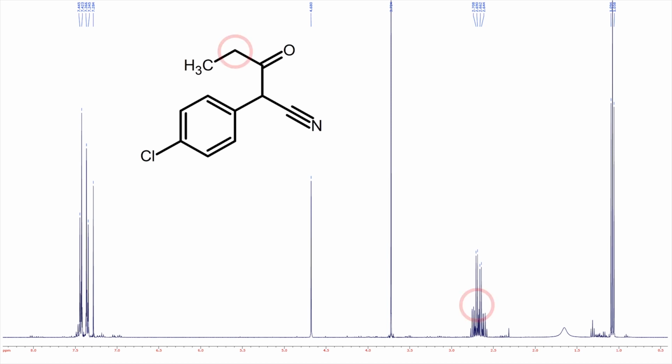Now for the interesting part, this complex multiplet is the protons right beside the ketone, and this triplet is the protons at the end. This complex multiplet is characteristic of our target compound, and this is very strong evidence we were successful in making it.